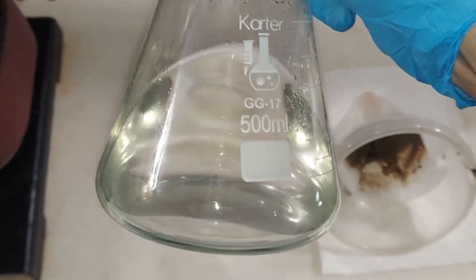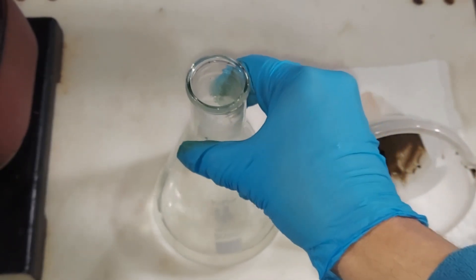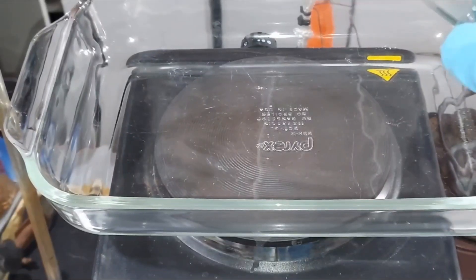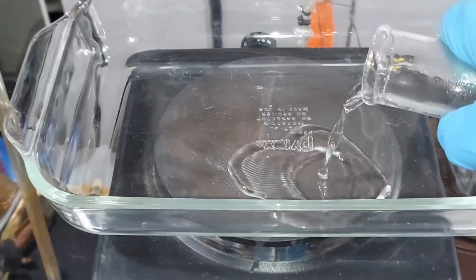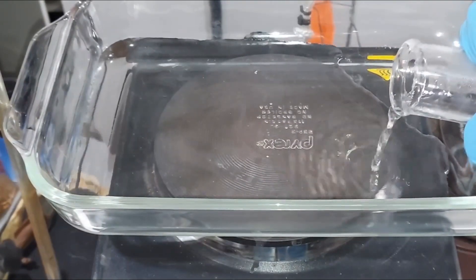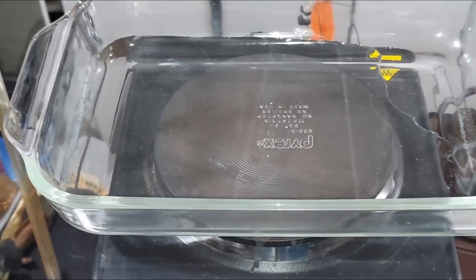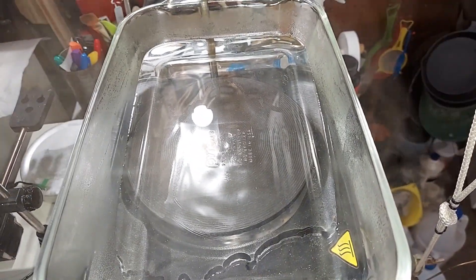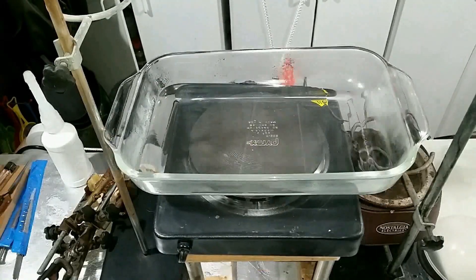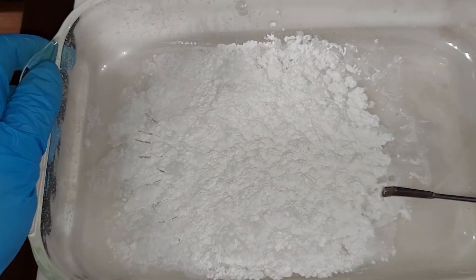Here's our relatively clear sodium nitrite. You'll notice it has a slight yellow tinge — and in real life it does. Sodium nitrite can have that, which is always encouraging before you're done when you have some evidence that things are going to turn out okay. I'm going to add the solution with the sodium nitrite in it to this Pyrex pan. I chose this open Pyrex dish rather than a beaker because scraping the crystals off of this is going to be a whole lot easier. Here's our dried sodium nitrite and it's on there good.